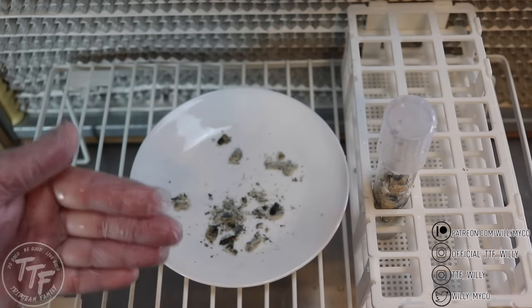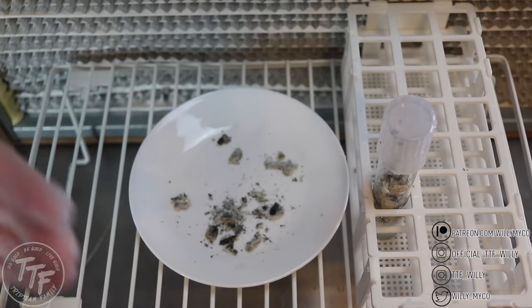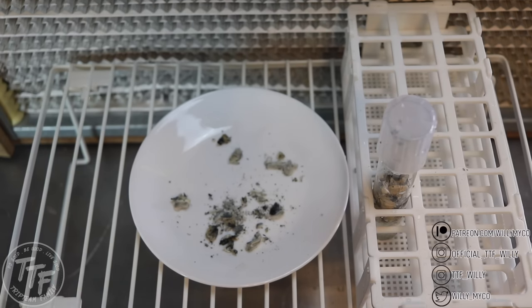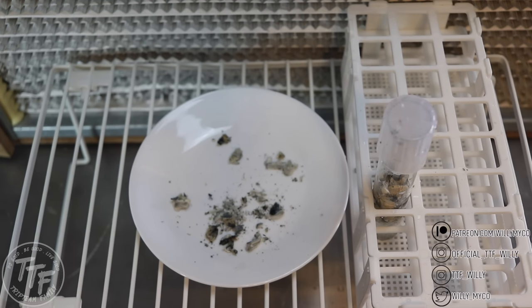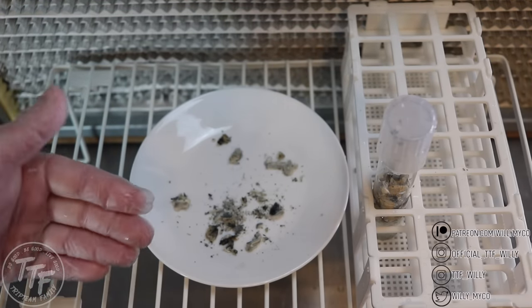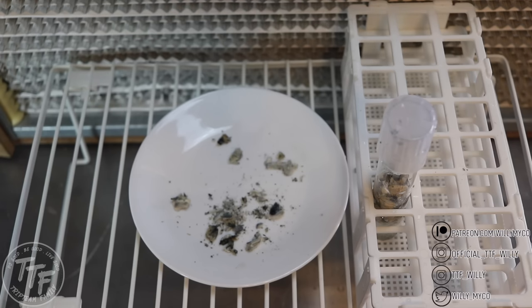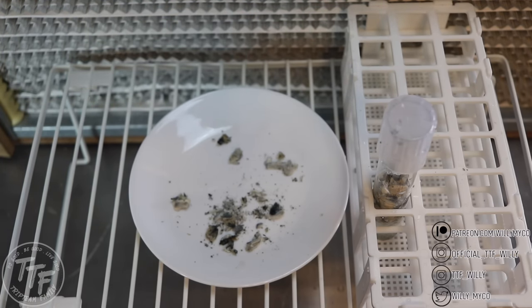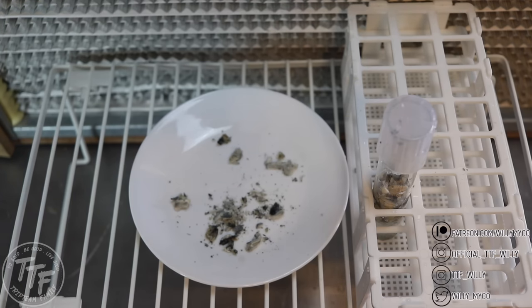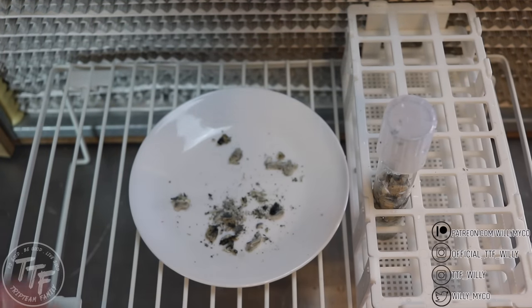It will be fully hydrated by then and will do really well on agar. Like I said, it really comes down to how long ago the mushrooms were dehydrated. If they were dehydrated 8, 9, 10, or 12 months ago, there's a lot less chance of re-sparking growth. Since we got these from Whole Foods, we don't know when they were actually dehydrated, so we're using them as an example. Hopefully we'll get some growth, but we're not 100% sure — that's the risk you take.